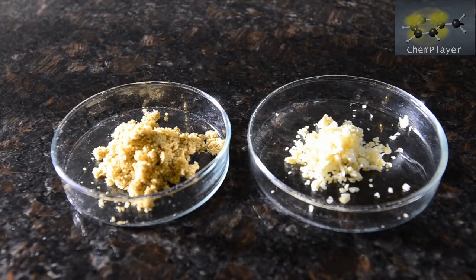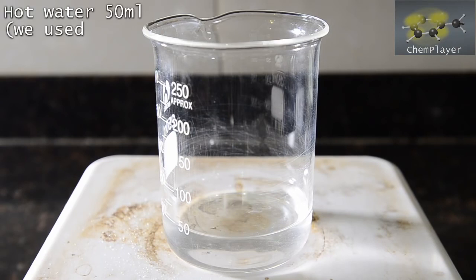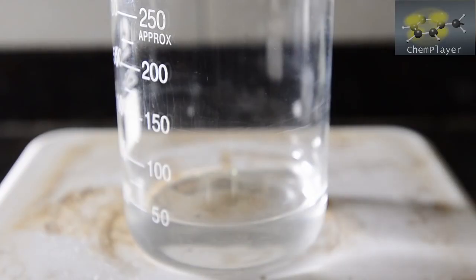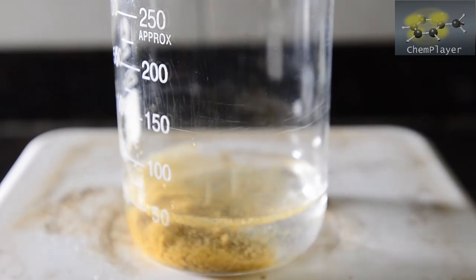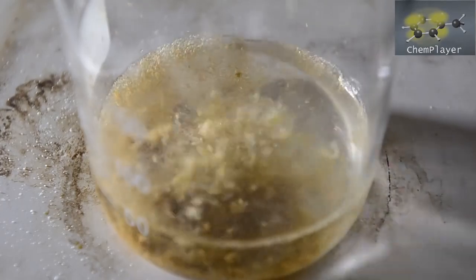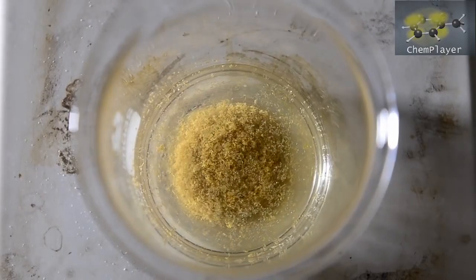So we don't know how pure they are. Okay, here's our potassium benzilate. Now we're going to dissolve this in hot water and then convert into the carboxylic acid. We're starting off with 50 ml of water, and we've got this in the beaker on a hot plate. Let's add our potassium benzilate. First batch. And the second batch.